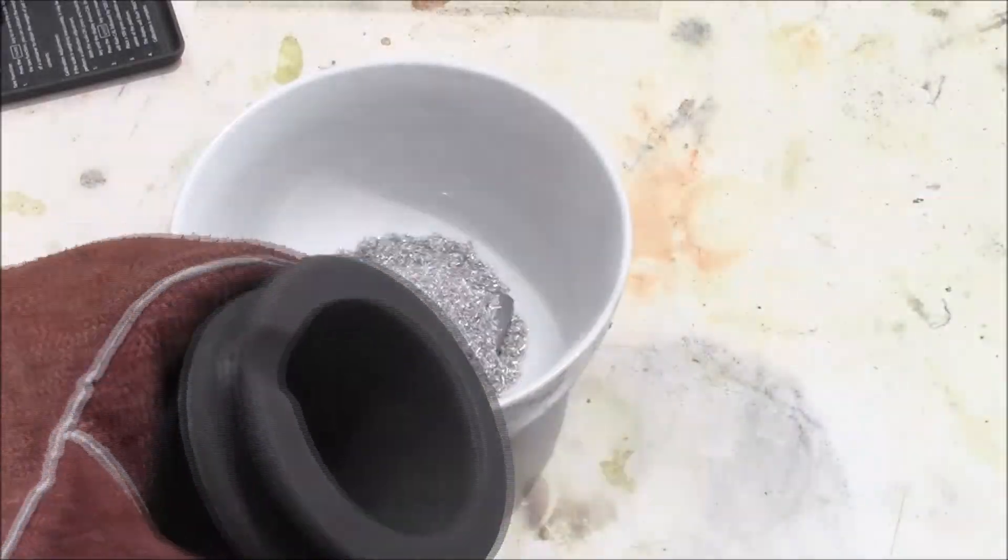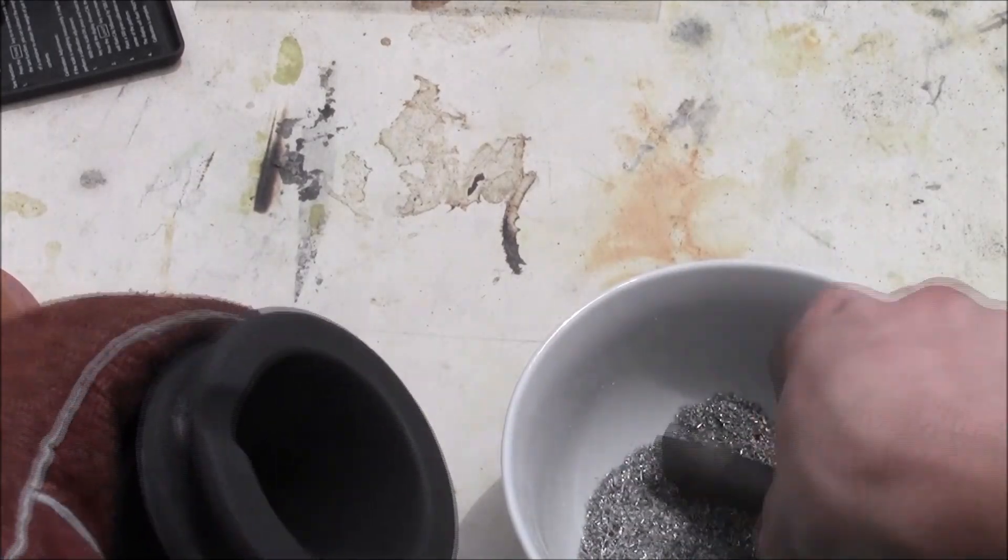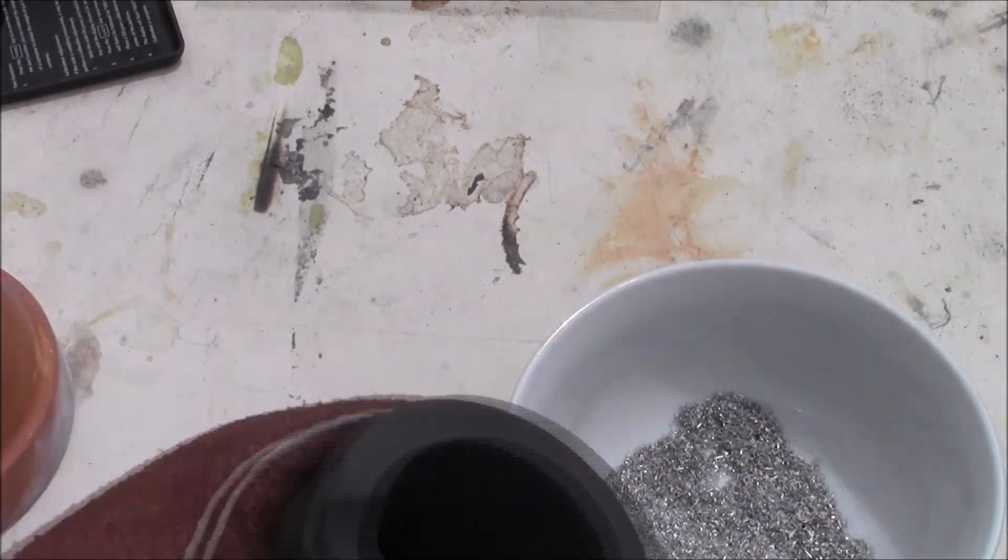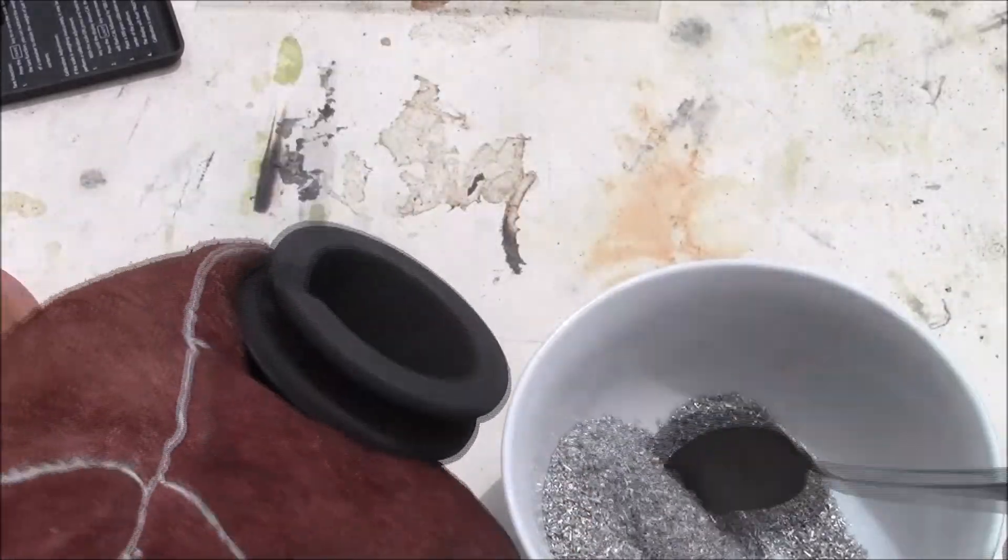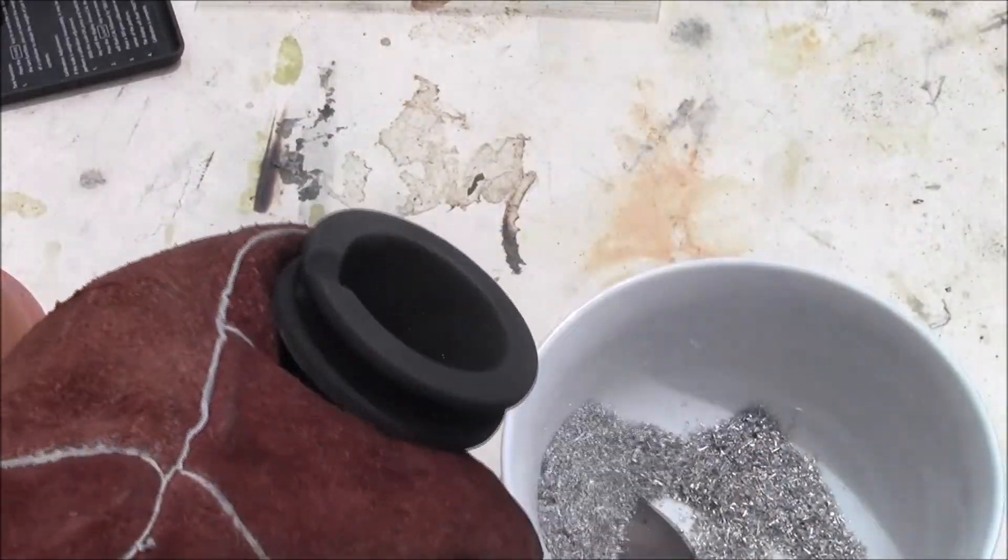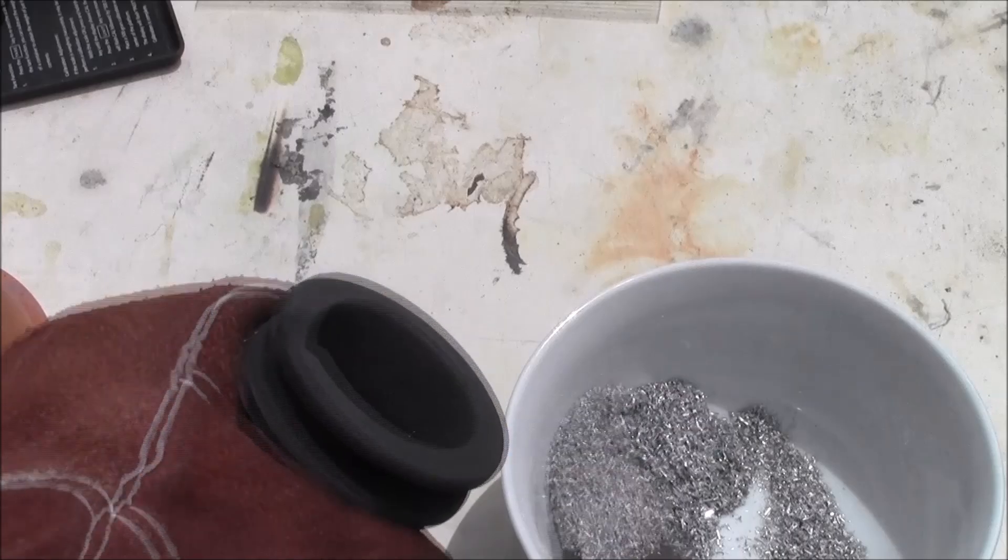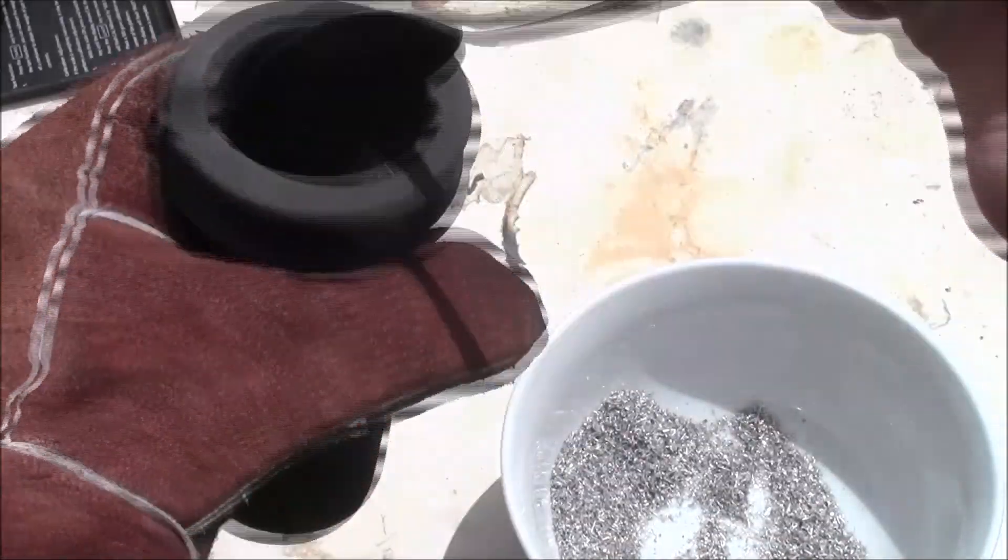Begin to add your products to the crucible you are using. I bought this for the main purpose of scrapping copper wire out of cables but it has also allowed me to try and make magnalium too. This was my first time making it so I was unsure what to expect.